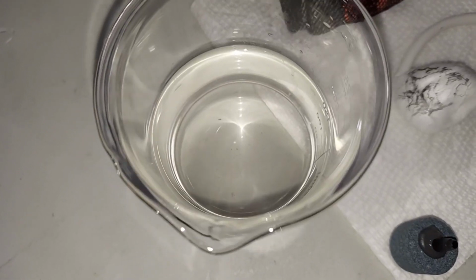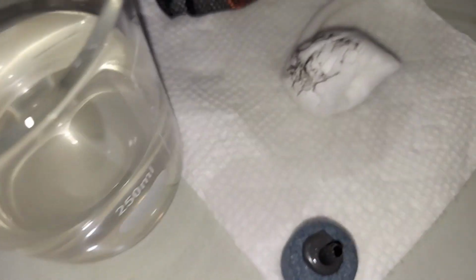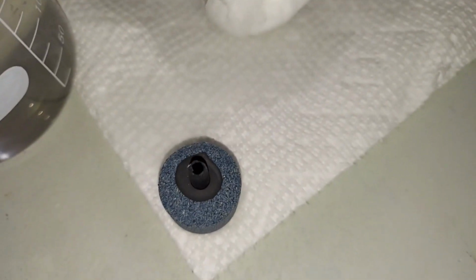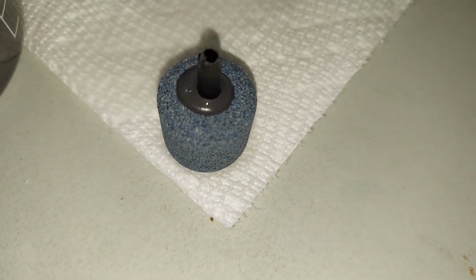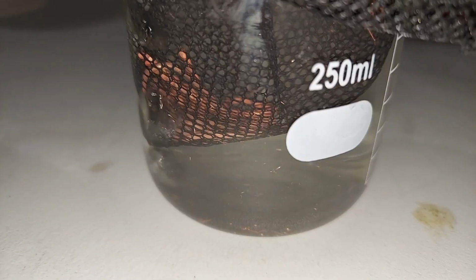6 days here, and I noticed there was something collecting on the bottom there. So I emptied this and wiped it up on a sponge, and it turns out, I can see it through a magnifying glass, that it's this stuff. It's breaking down in the acetic acid over time. So I'm going to take the stone off and put everything back together. Well, it's a lot louder, but we certainly couldn't have those contaminants in there. We know the copper is breaking down. We can see bits of wire there that are bouncing around in the solution, so that's a really good sign.